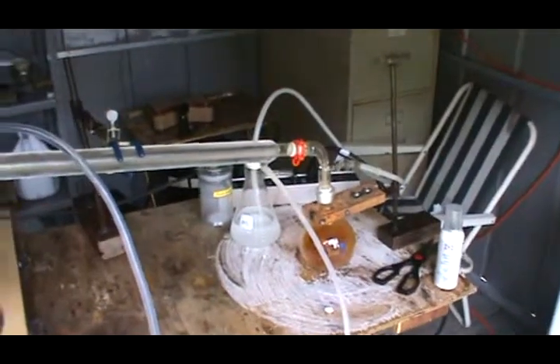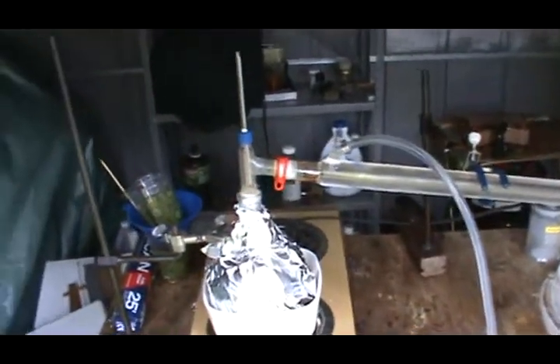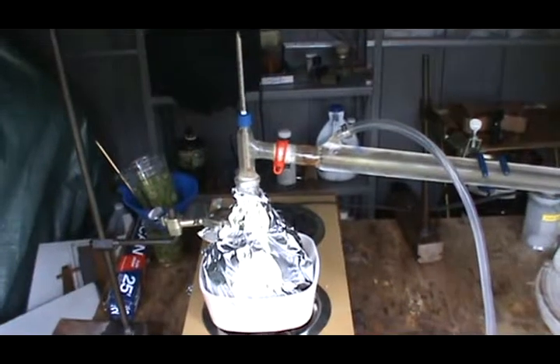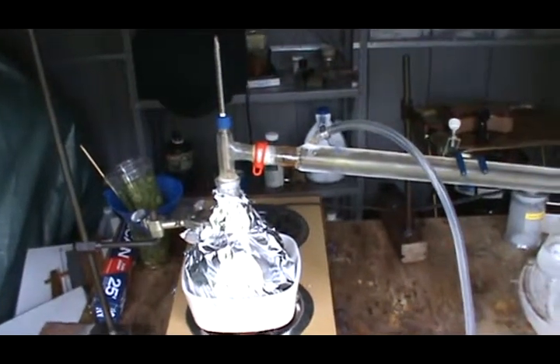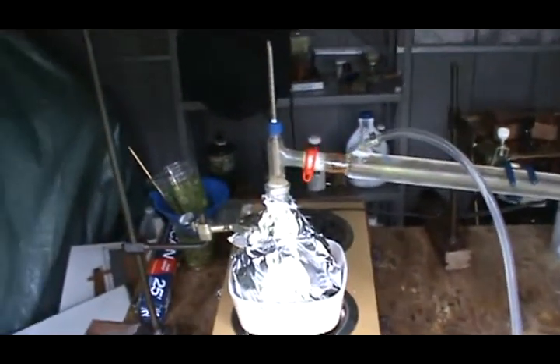I have a very long Liebig condenser. Longer the better. The short ones are not really efficient at condensing the fumes. Mine's 500 millimeters or so.